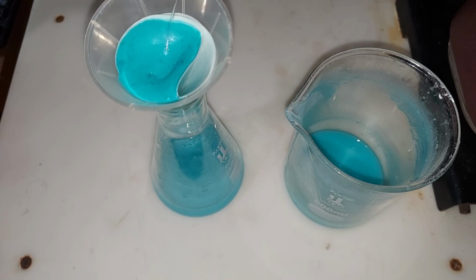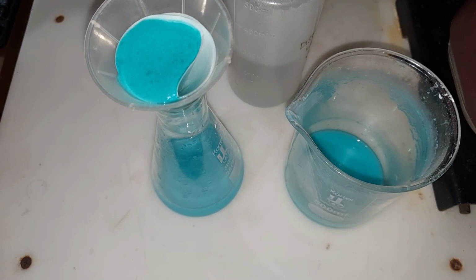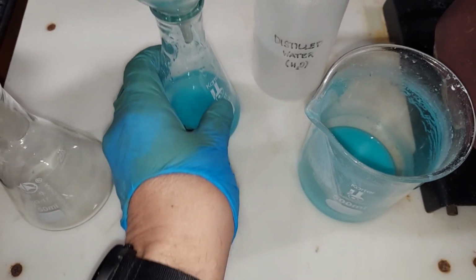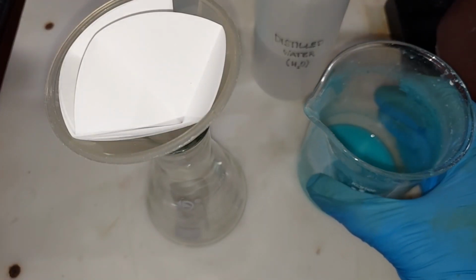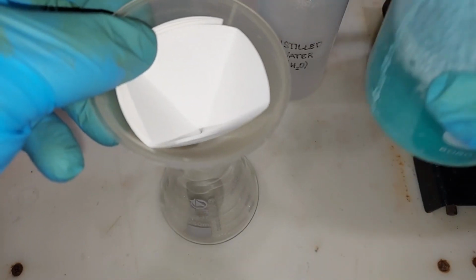There is some sodium acetate in here, so I'm going to run some distilled water through this, let that drip through, do it a few times, and then I'll have to switch to filter paper to get the rest of the copper carbonate out of there. While the distilled water continues to wash through here, that's about the 3rd time I've washed it, and I think I'm going to be done with that. I have some new filter paper here that's a little bigger. I'm going to save myself some tedious work, I think, but we'll run it through here.